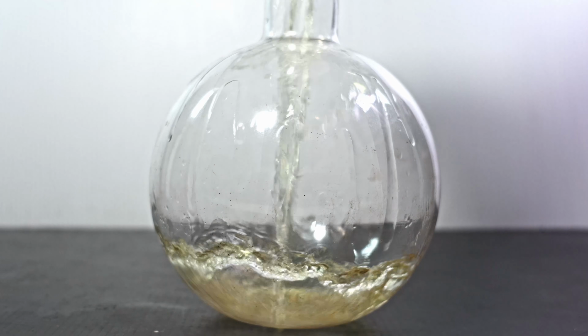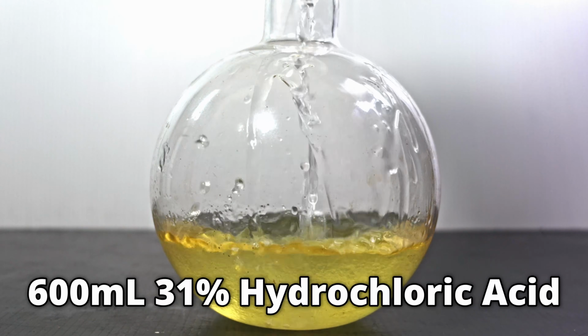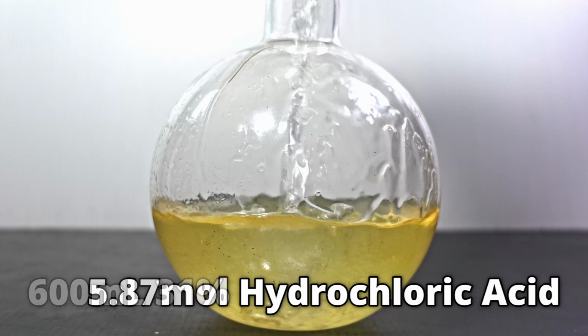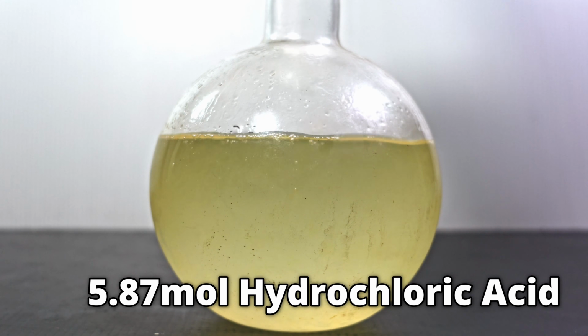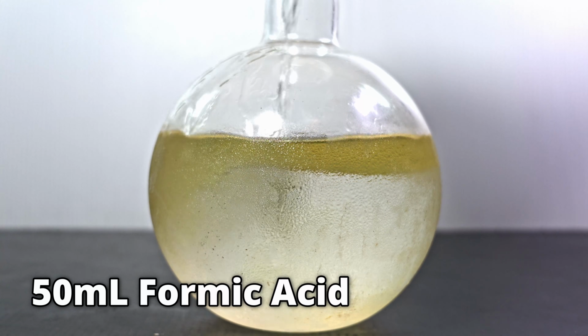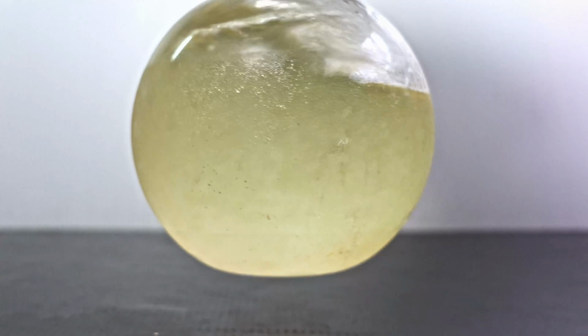For the conversion, I pour it all out into a 1 liter boiling flask. I add 600 milliliters of 31% hydrochloric acid. This has approximately 5.87 moles of hydrochloric acid, about 1.25 molar excess. I also add 50 milliliters of 95% formic acid to help solvate the nitromethane better. I think it's already working too.